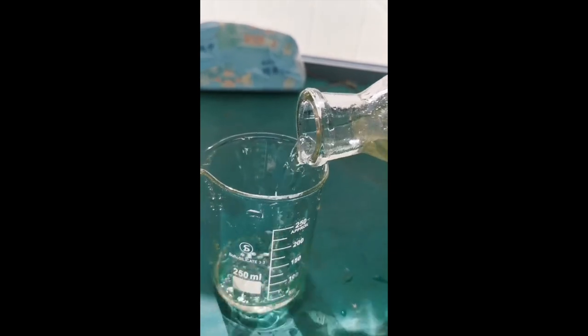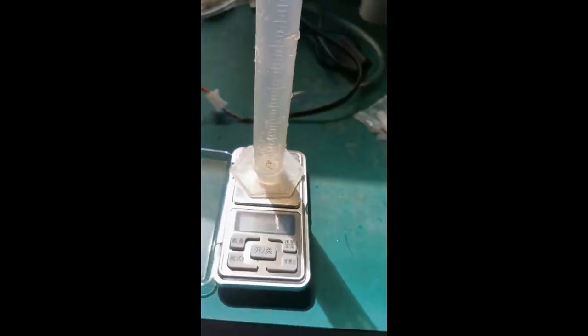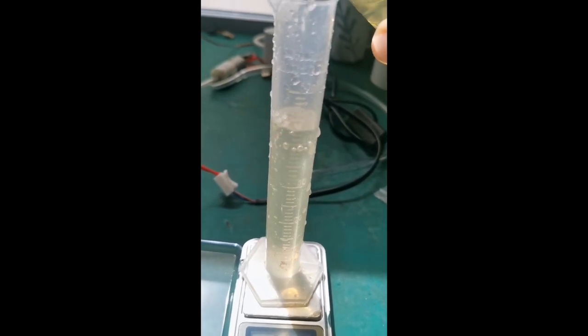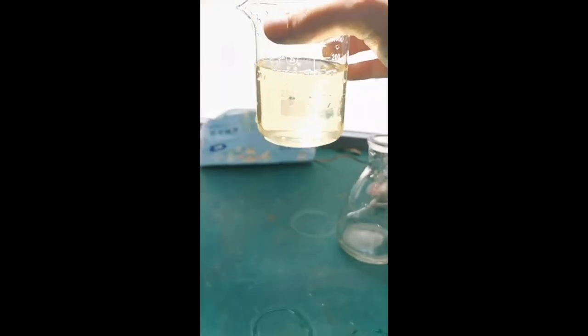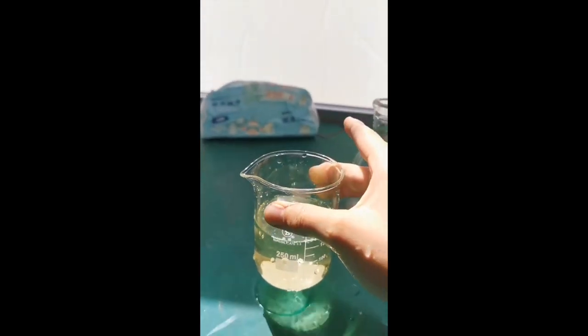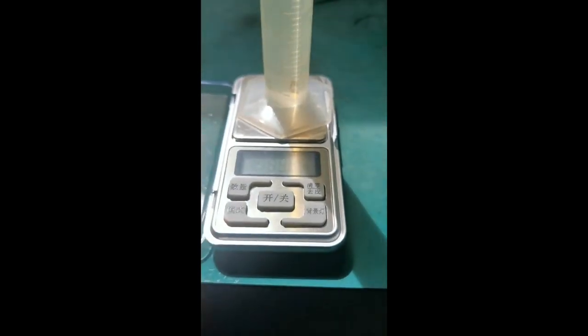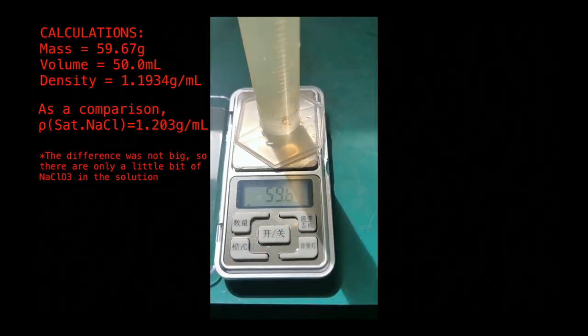I poured the filtrate into a beaker, and it was about 150 milliliters. I measured out 50 milliliters of the solution and took accurate mass measurements. However, I accidentally spilled the solution on the table. Later, I was able to recover a portion using tissue papers, but unfortunately I lost about 30 milliliters of the solution. So I just did the measurement again, and this time I fortunately did not spill it. The mass of the solution was 59.67 grams, which corresponds with a density of 1.1934 grams per milliliter.